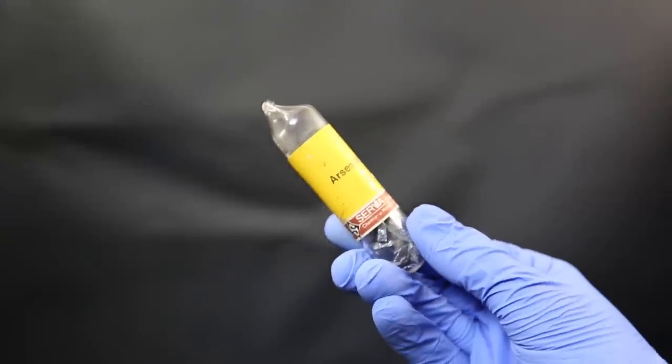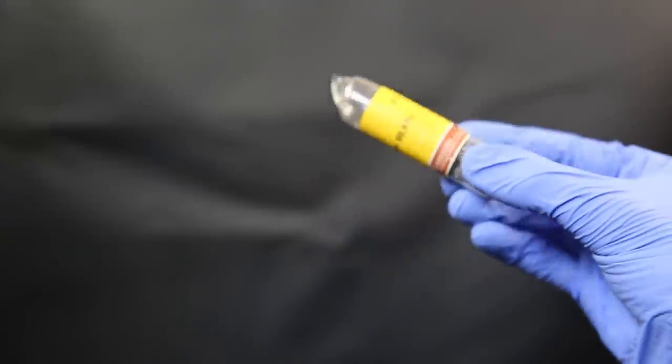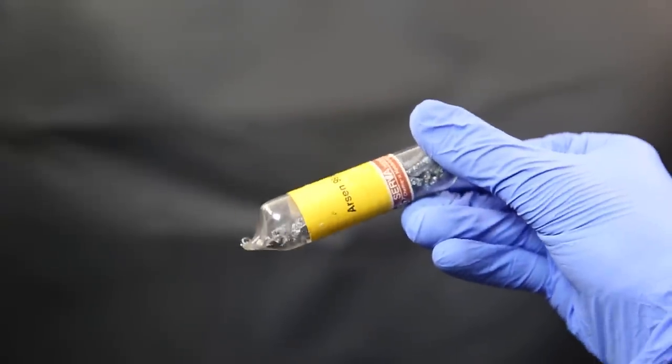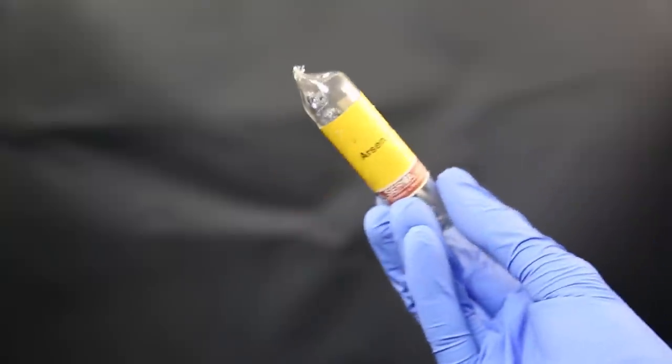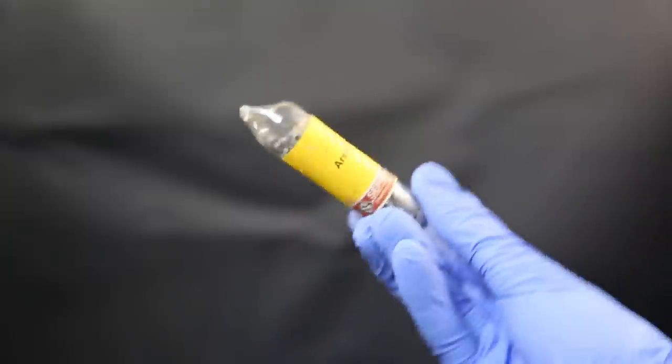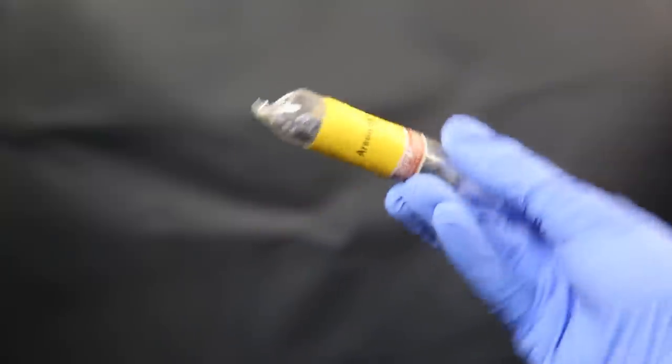So here is the arsenic that I will be using for this reaction. It is an old ampoule from many decades ago. But before I break it, I will prepare the reaction setup so that it doesn't sit in the air for too long and oxidize.